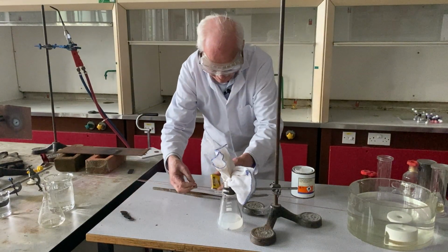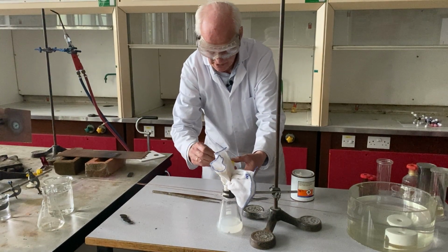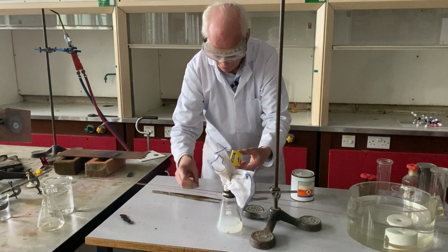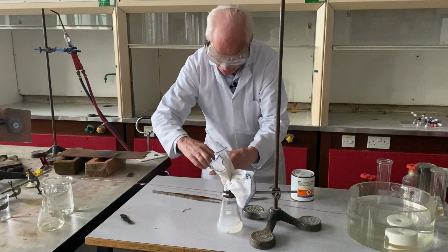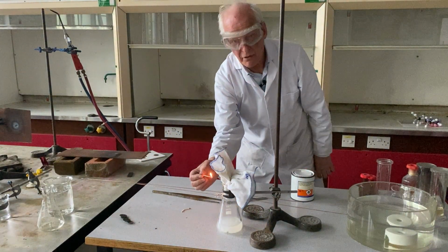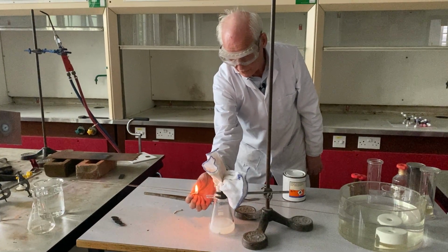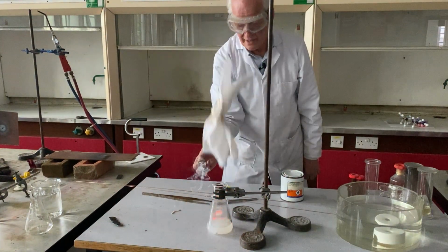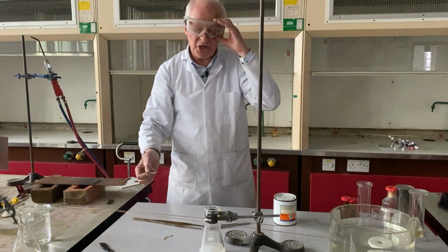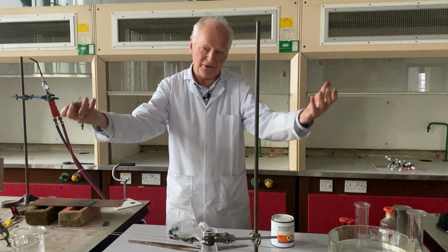Let's just light it with a match, and hopefully the thing will come popping out. So just get our flame. Whoops, that one wasn't so good. Try once again. Here. And now, fingers crossed for a successful propulsion of the cotton cloth. And there you see. So, the experiment was very successful. The cloth has flown out of the flask.